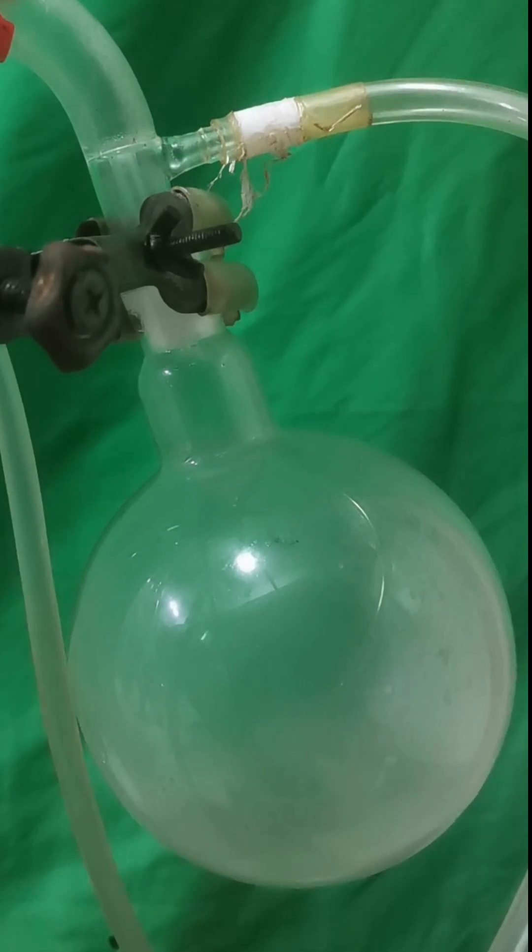This is the second distillation. This liquid is high-concentrated hydrogen peroxide. It is very dangerous.